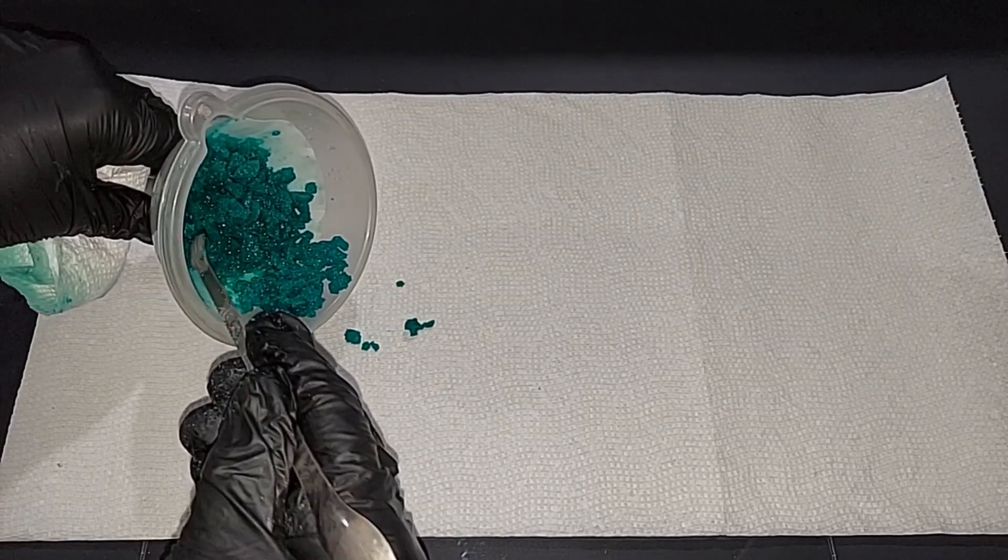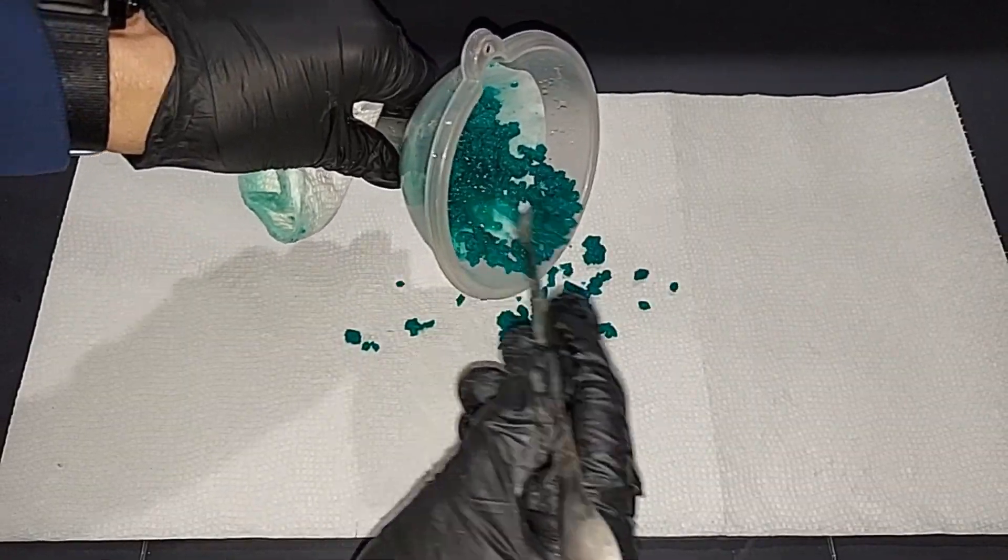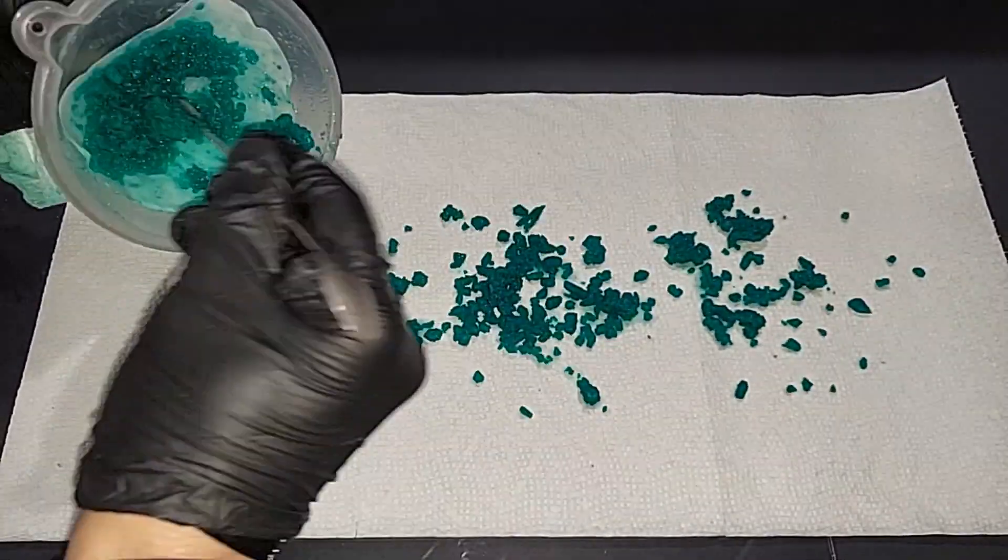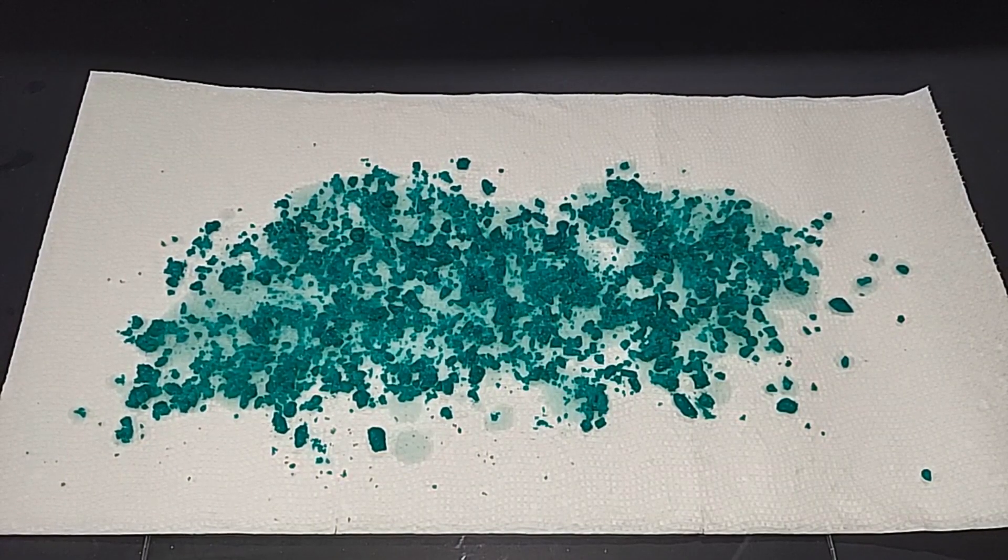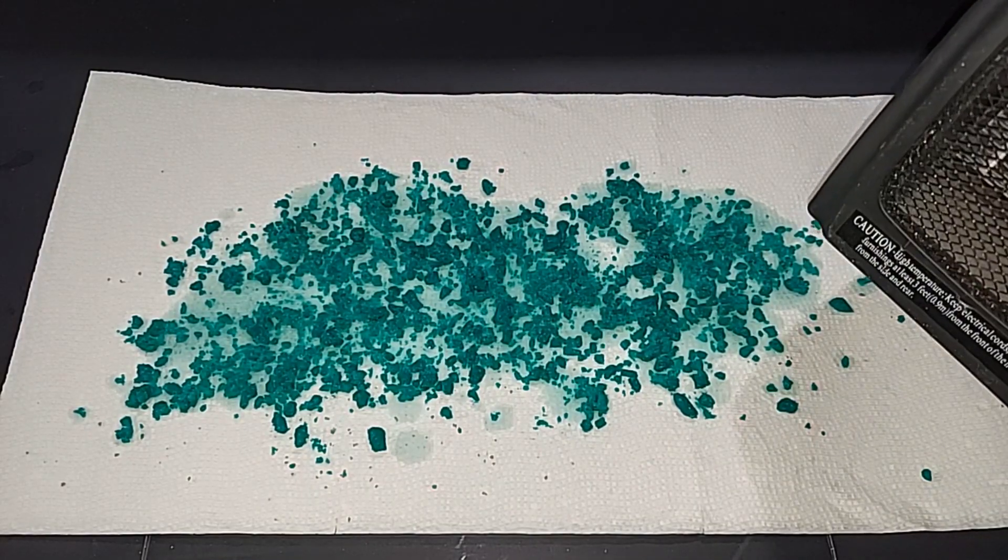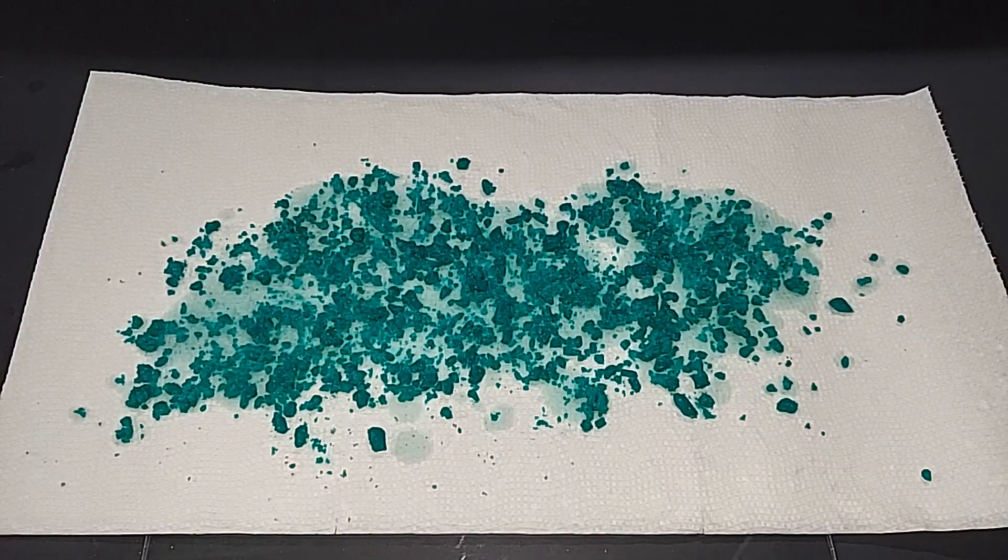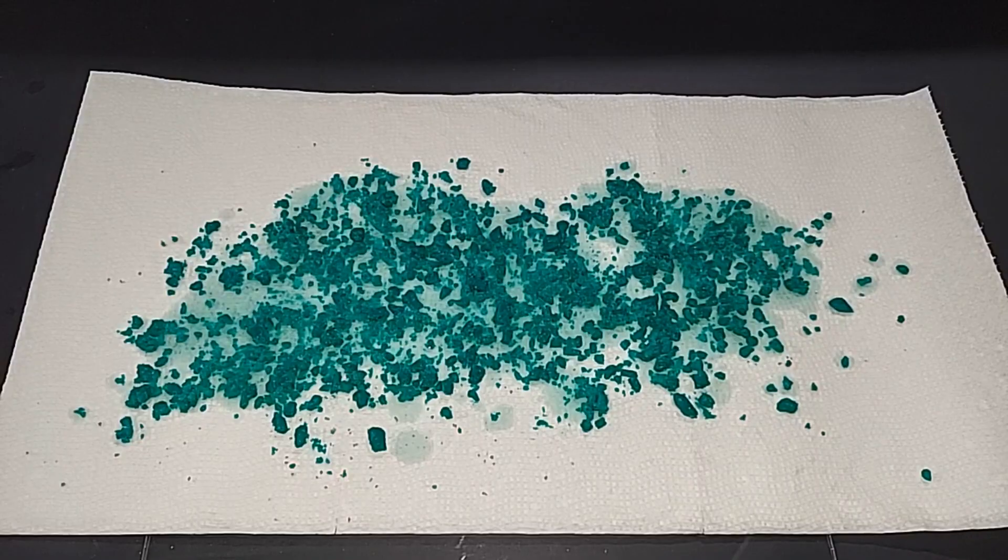Done. If you heat nickel nitrate crystals too much, they'll dissolve in their own water, so I'm going to spread these out here because they're going to have to air dry. I got everything out of the filter paper, spread it out a little better, and I have this fan on the side. You can see it right here and hear it. Just have to let them dry completely and then we'll weigh them.